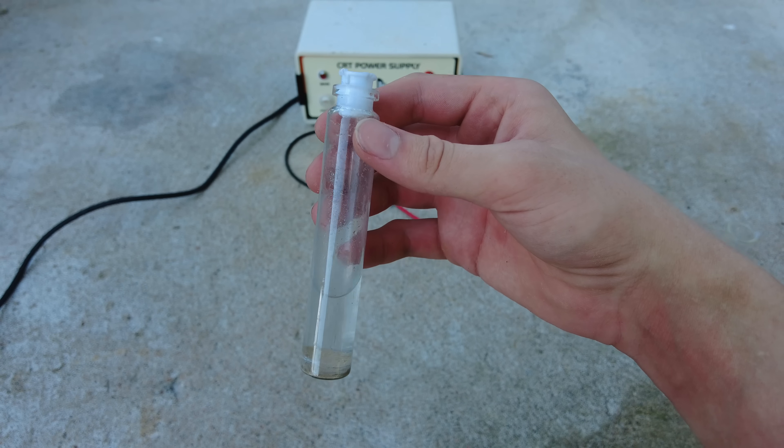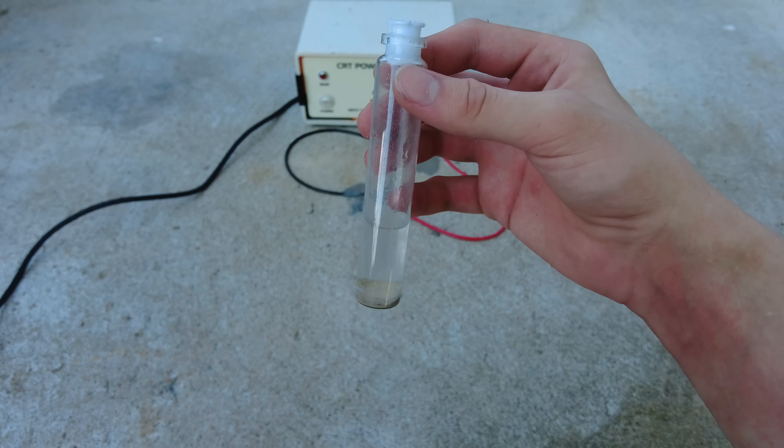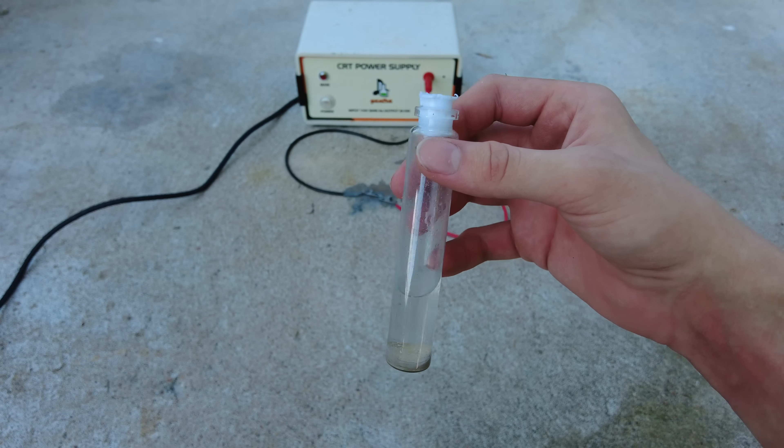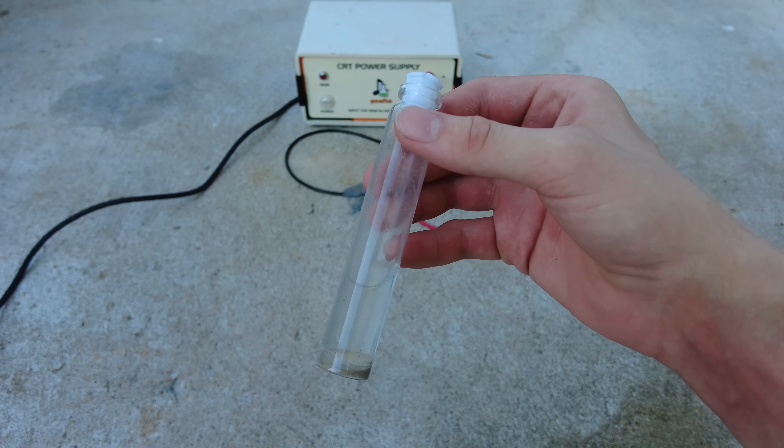Now it's time to try it with the hammer and laser pointer. This batch actually came from yesterday when some idiot created a video on how to make mercury fulminate and recorded and edited the entire thing and lost the footage, so what a dummy.